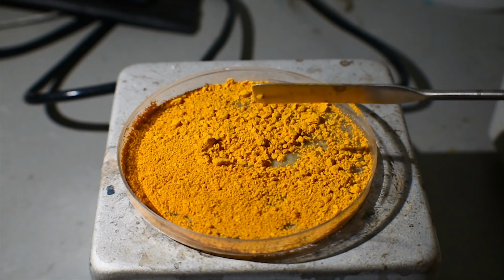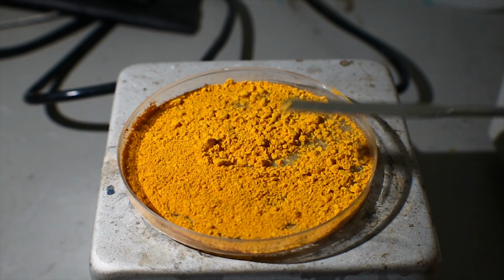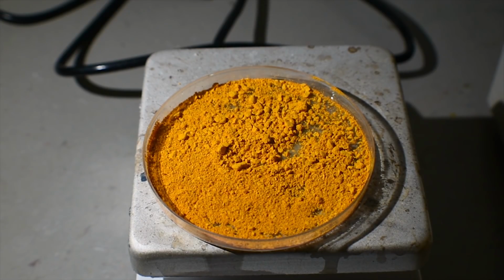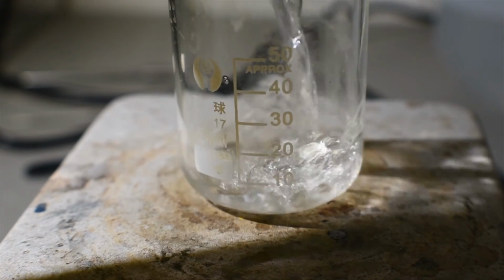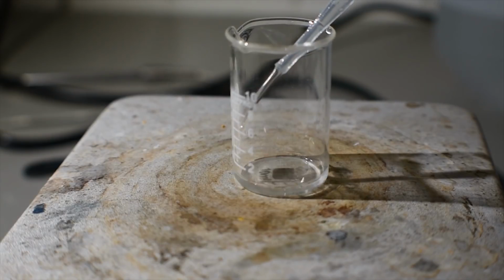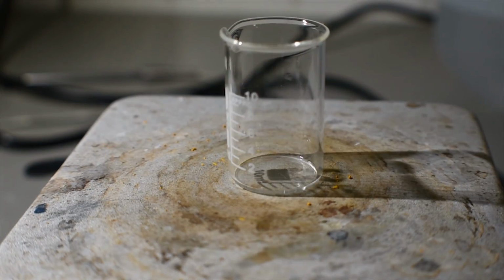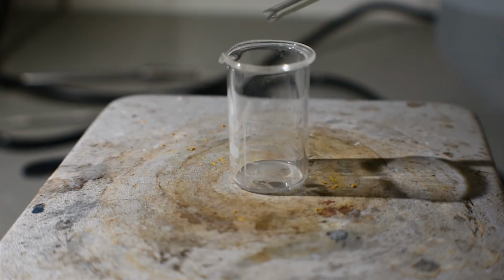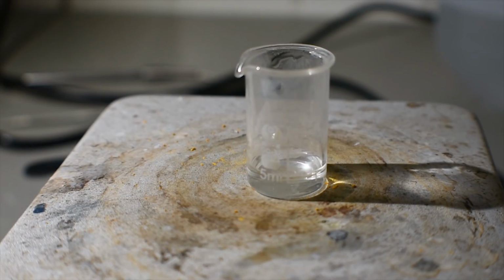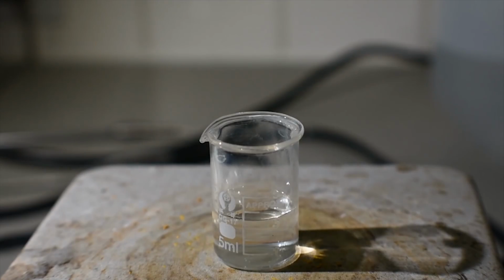Let's see some of the physical properties and see if it's soluble in anything. Now, the questions we must ask are, is it soluble in water? No. Methanol? Nope. Ethanol? I'm afraid not. Acetonitrile? That's a negative. Chloroform? Ethylene diamine? I mean, okay. Hydrazoic acid? Who made this list? Wait, no!